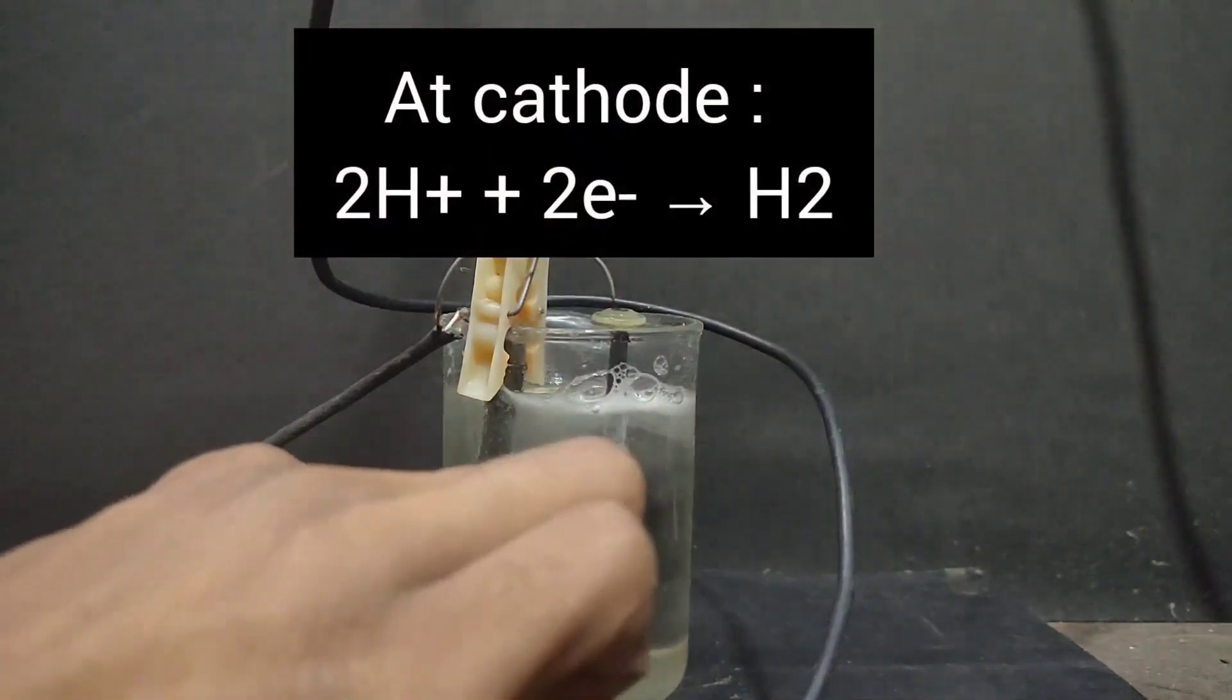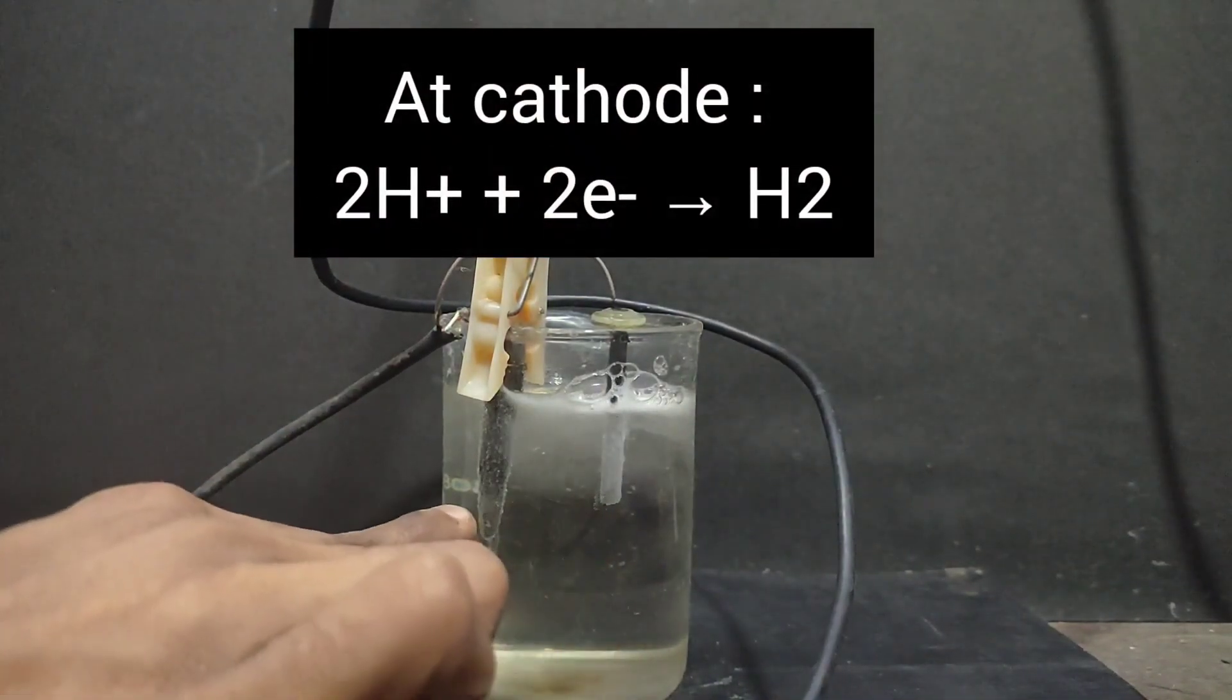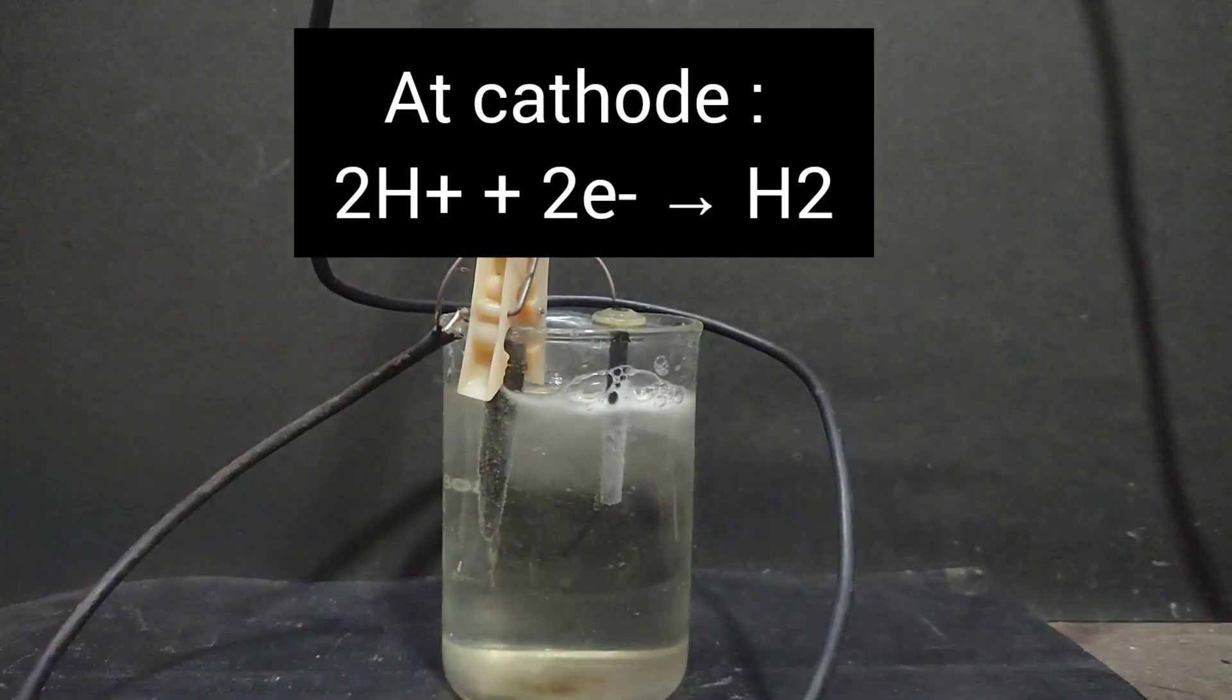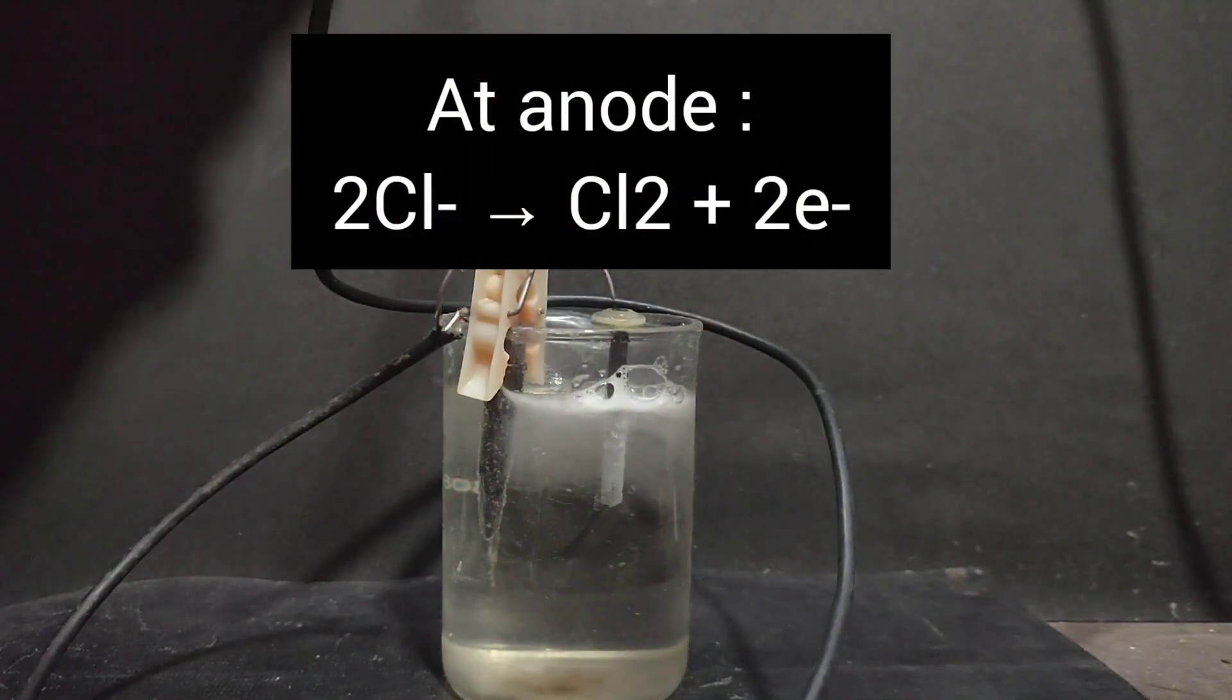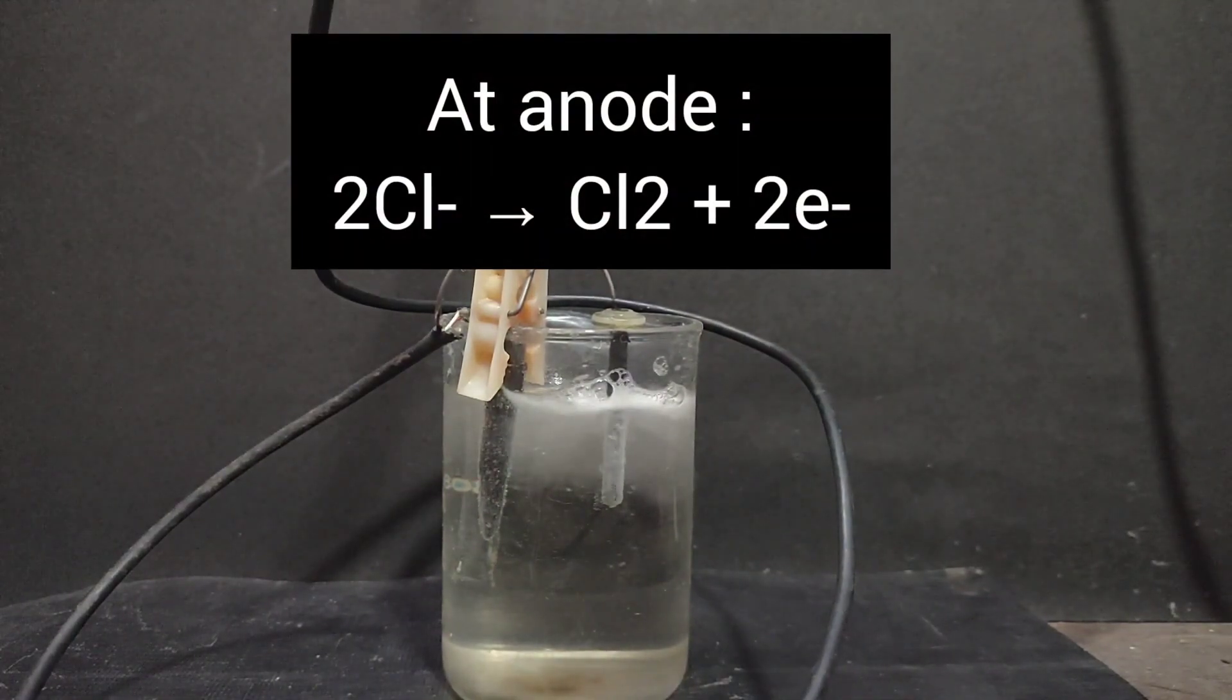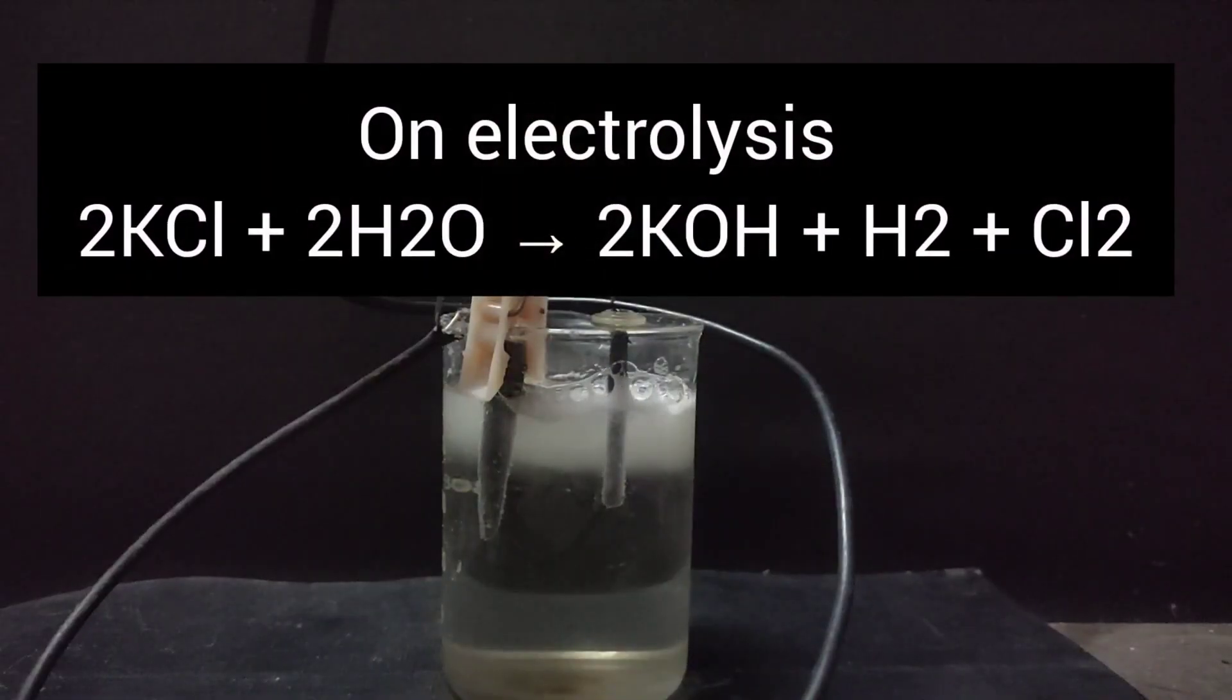On the cathode the H+ ions are getting reduced to hydrogen, and on the anode the chloride ions, because they are in more concentration, are getting oxidized to chlorine, as a result of which potassium hydroxide is left in the solution.